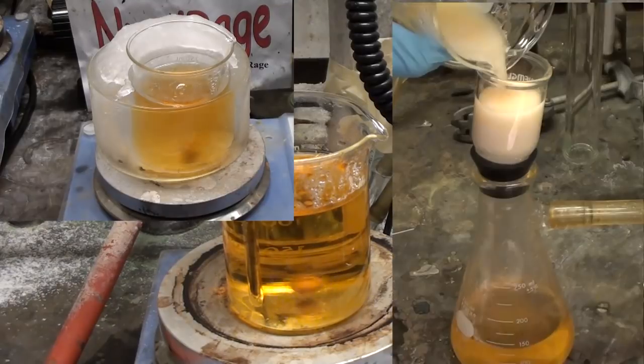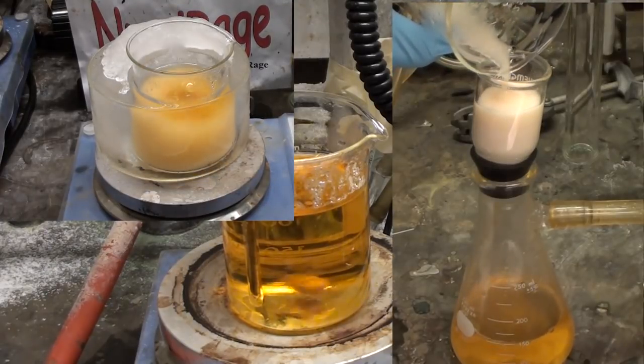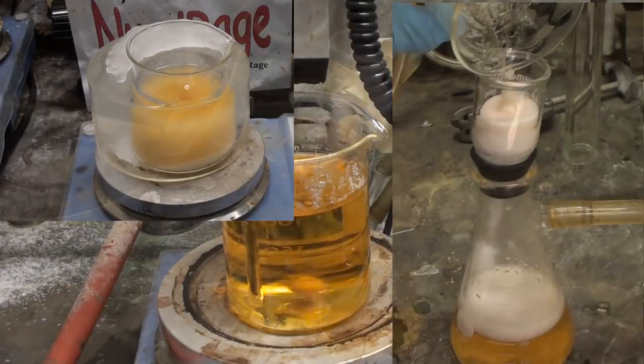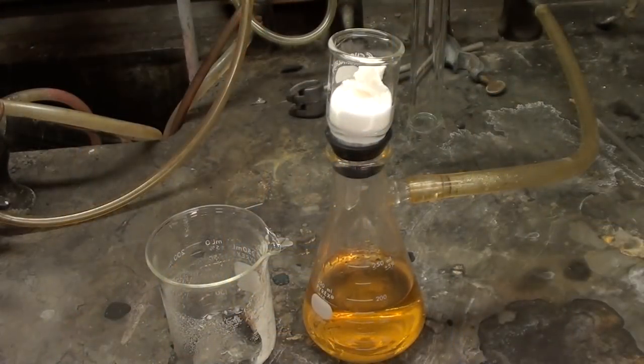Hydrolysis of acetone azine is very slow, and repeated heating, cooling and filtration is needed. Once again keep repeating until no more crystals come out. The total yield was in the 40-50% range.